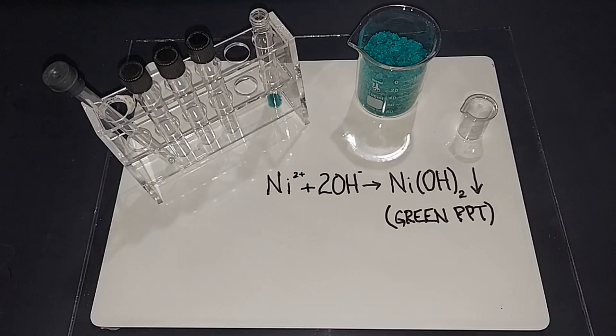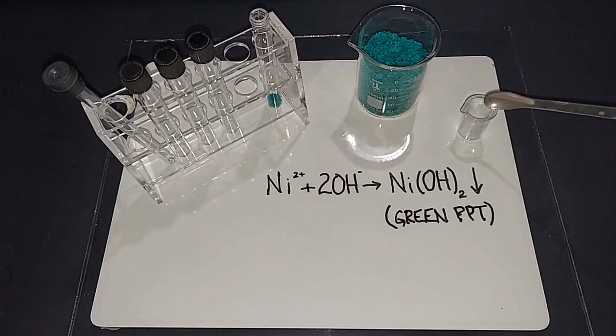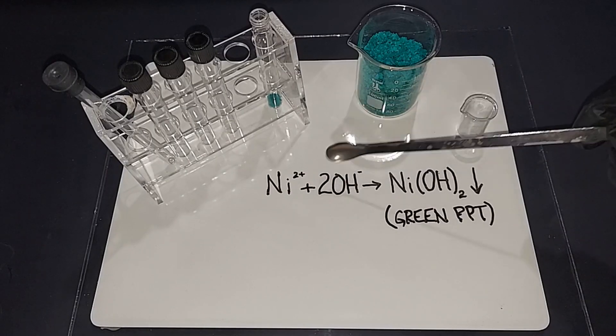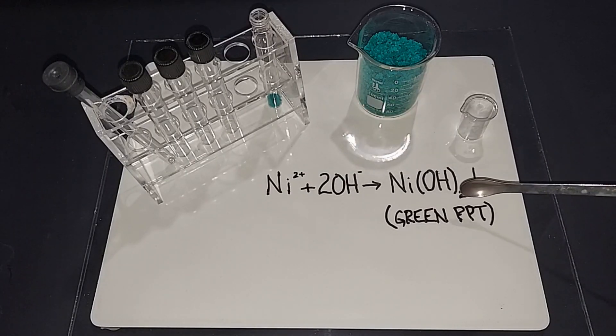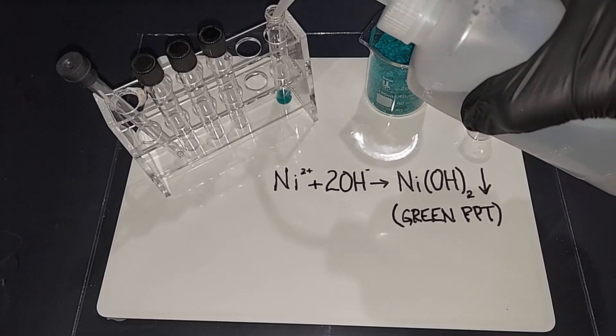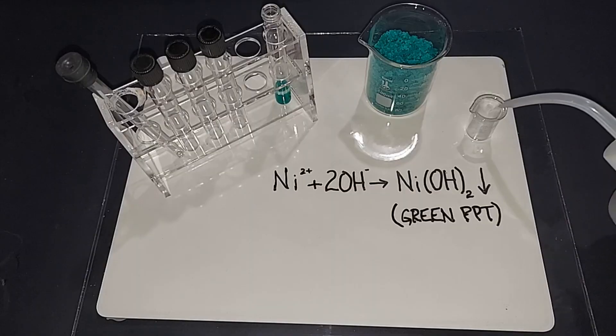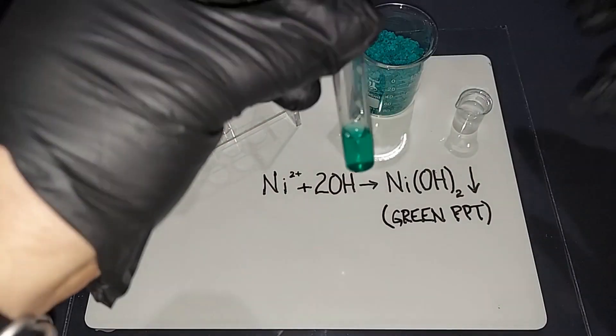Now on to some testing. You can see the equation right here. I'm going to dissolve this nickel nitrate, and this is also sodium hydroxide. You can see when the nickel ions and the hydroxide ions combine, you get nickel hydroxide, which is a green precipitate. Just adding a little water to both of them. Now that they're both dissolved, I'll show you the reaction here real quick. And there's your nickel hydroxide precipitate.